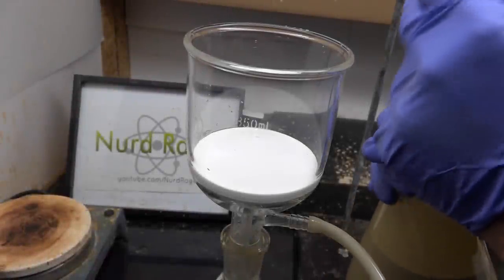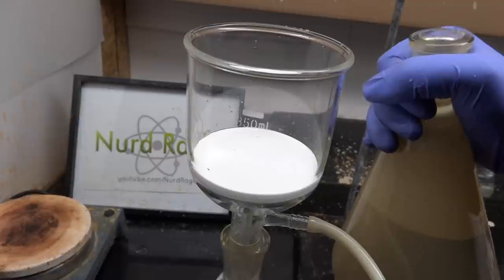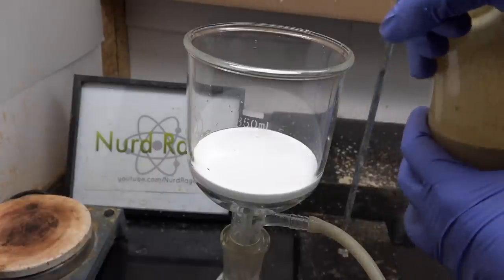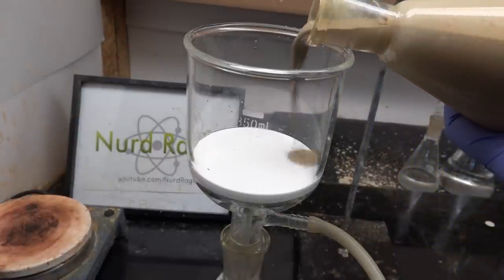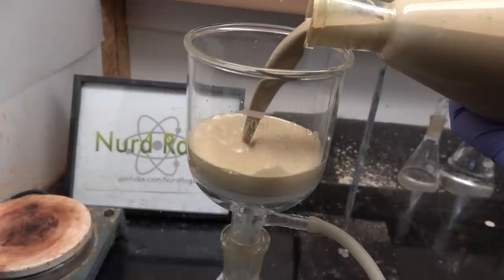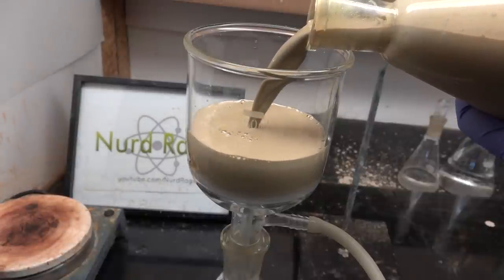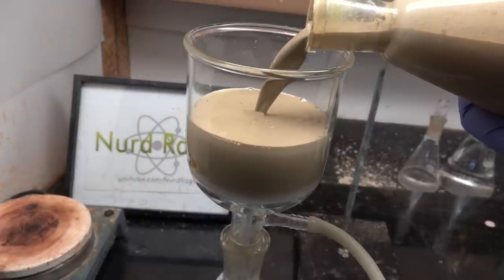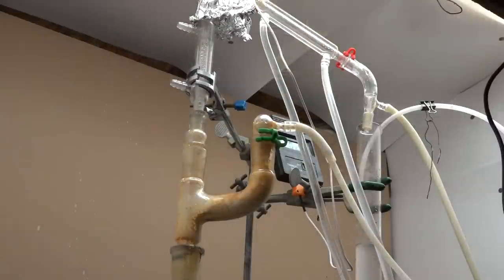This is a bit tedious because we can't just distill it as it's too thick and gooey. Filtering is also problematic as the particles are fine enough to clog the filter and a lot of it remains soaked in the residues.